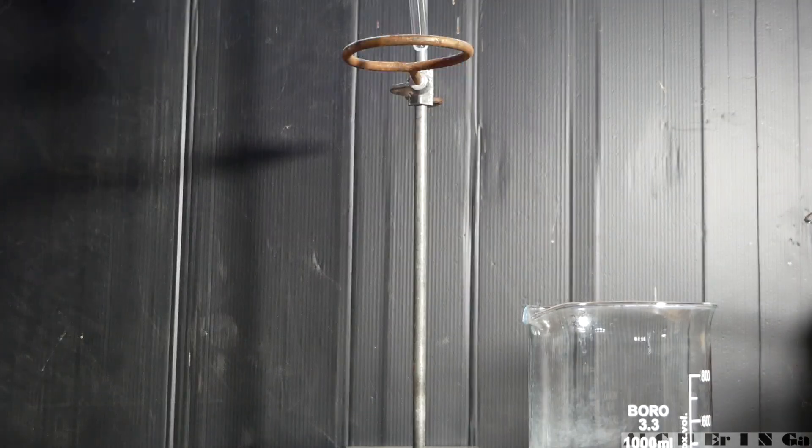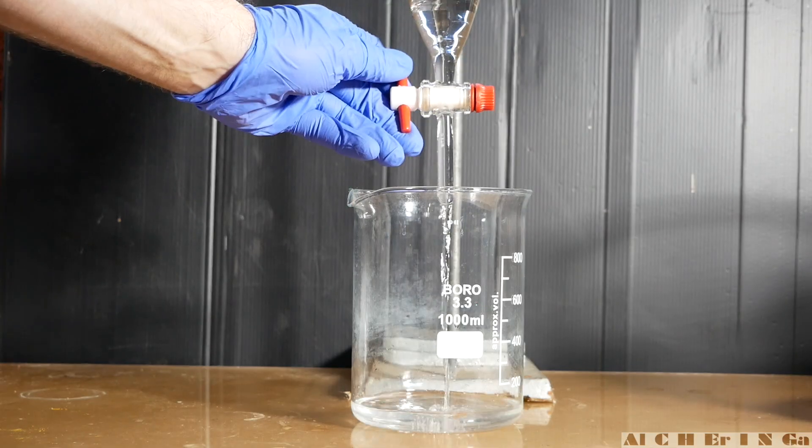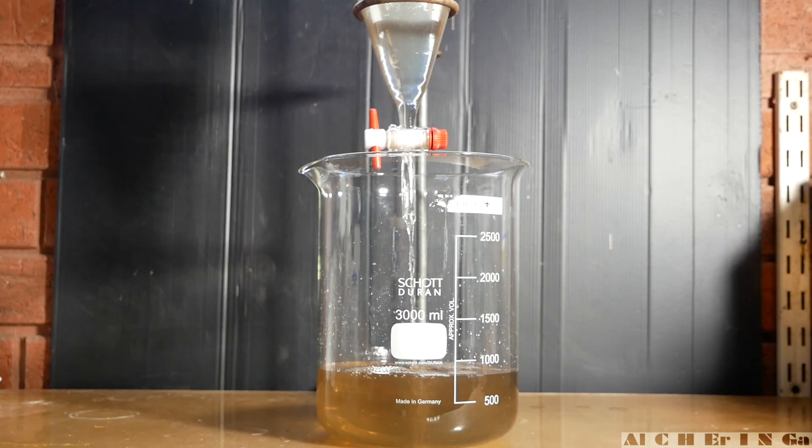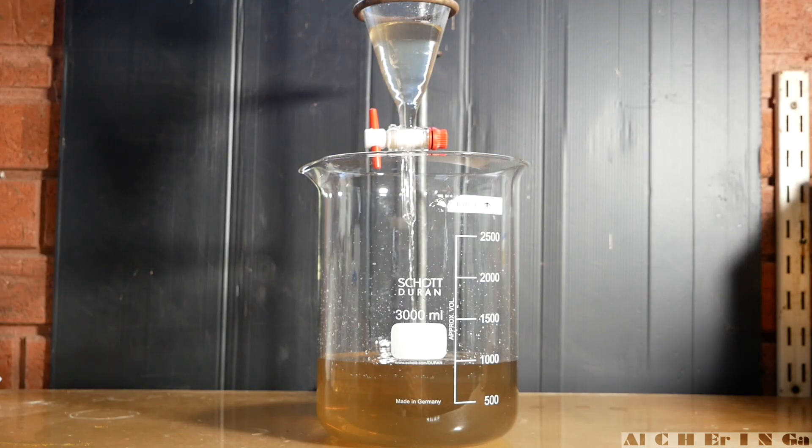Swirl the separatory funnel, vent and decant the bottom layer to a beaker and discard. Drain the upper layer to the beaker. This is the first washing with dichloromethane complete.